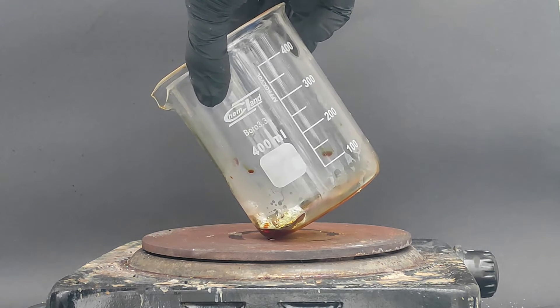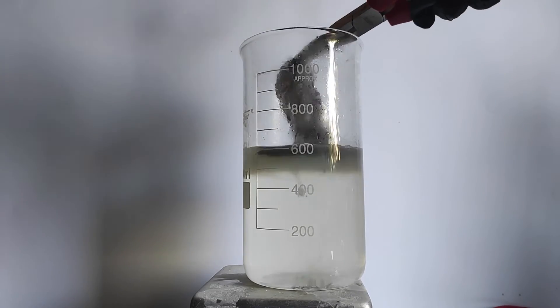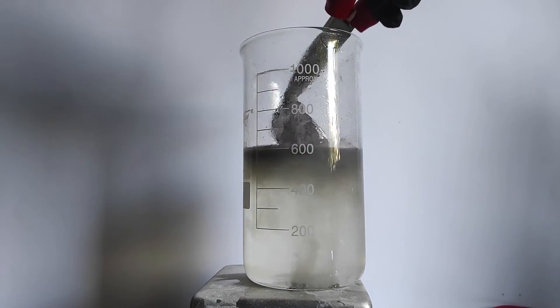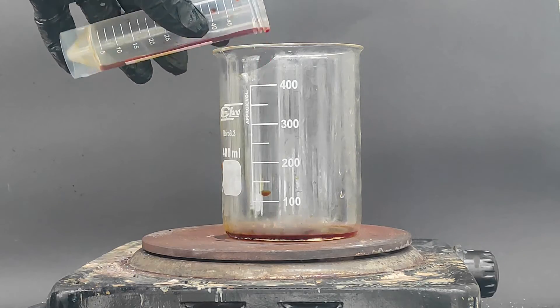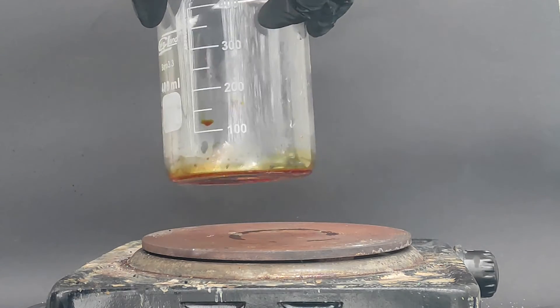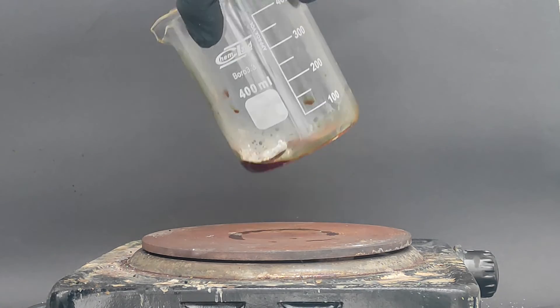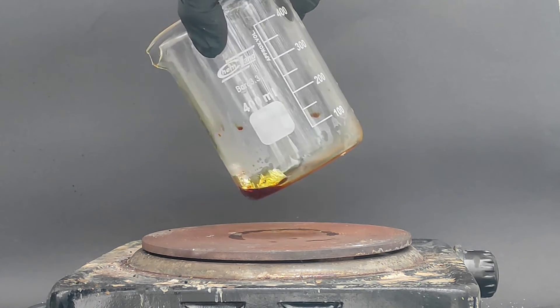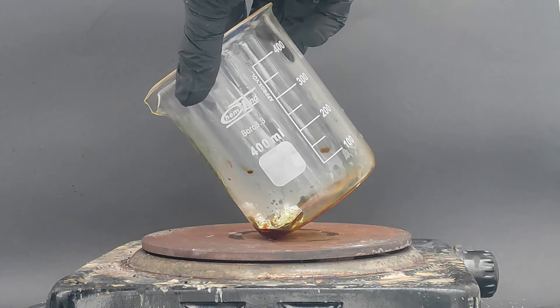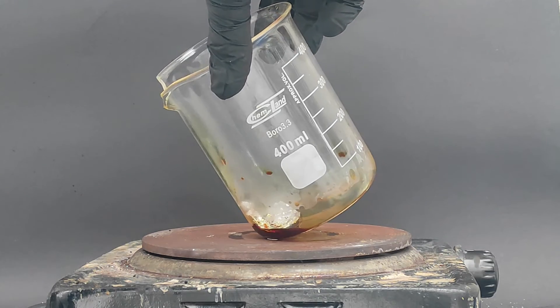For this experiment I'll be testing if aluminum foil reacts with the acid. When using hydrochloric acid the acid starts eating it apart, but I was curious if the hydroiodic acid would act the same. The acid was poured into the beaker and then I added some aluminum foil. I was ready for it to start shredding into pieces but was severely disappointed. Obviously hydrochloric acid in most uses is concentrated, and the hydroiodic acid's poor performance could be due to it being quite dilute. However, even dilute hydrochloric acid at least reacts with aluminum.